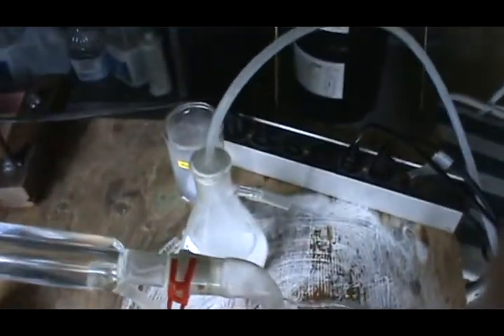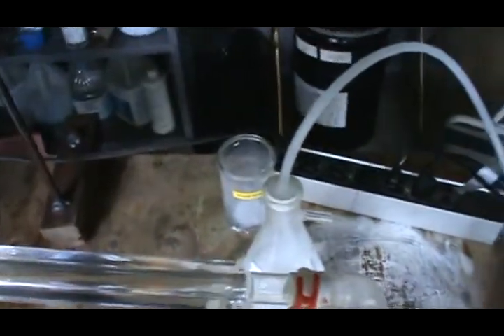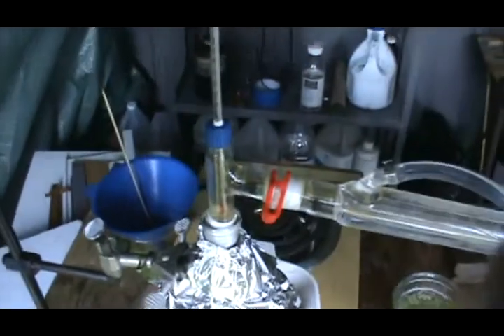I also got the NO2 fumes neutralizing in a bottle of lye so I don't have to worry about the fumes wrecking my shed. Now I turned the heat on and I'm just gonna wait for it to get up to temperature.